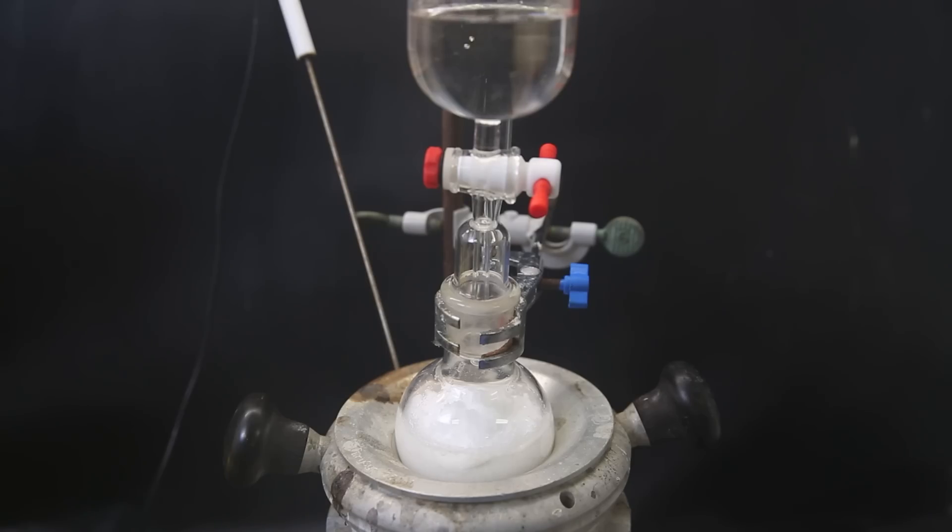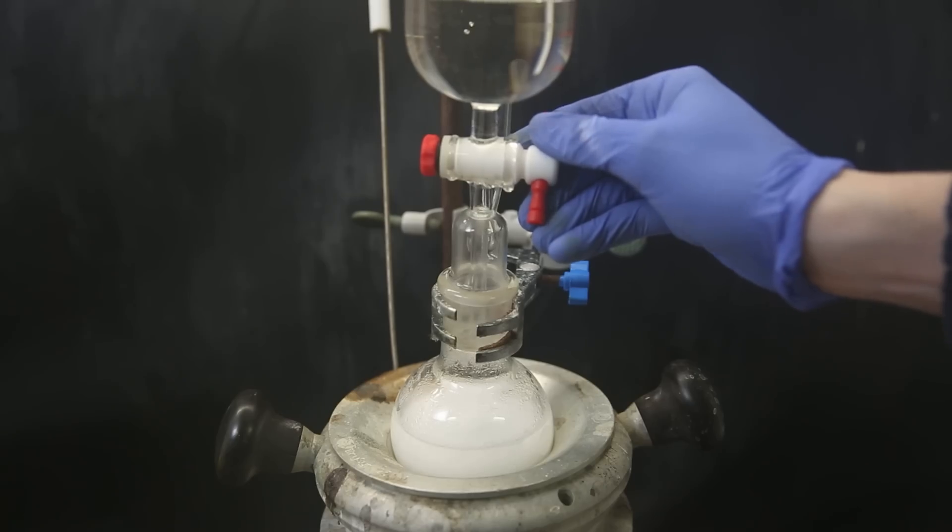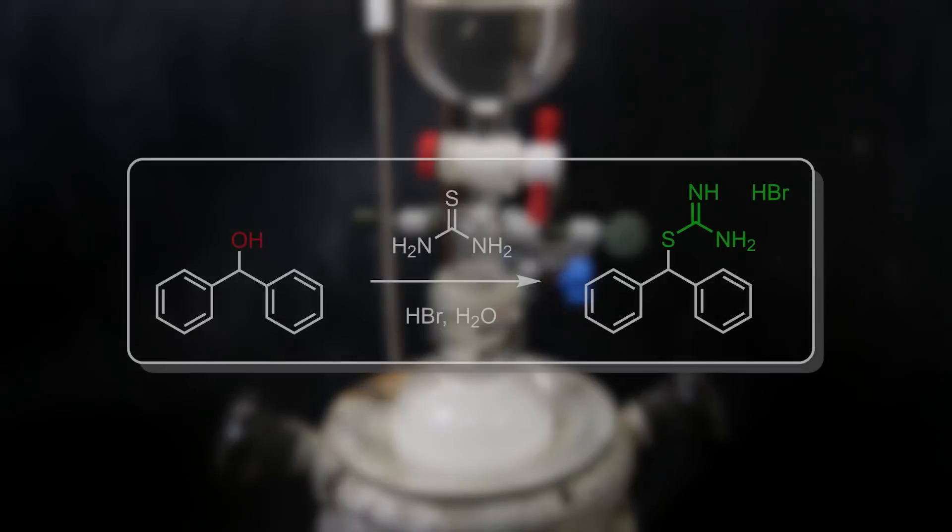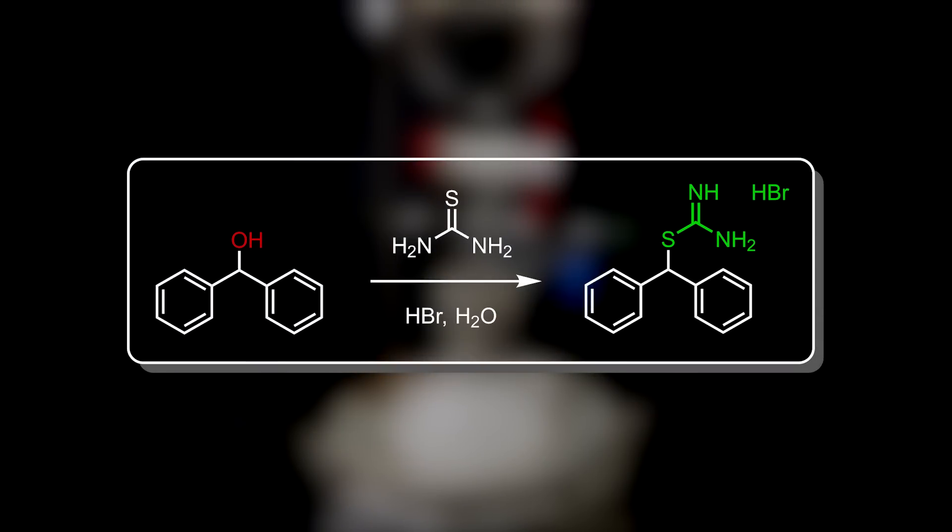I first leave this mixture to stir at 90°C and wait until it loosens up. When that happens, I dropwise add the hydrobromic acid and leave it to stir for an hour afterward. In this reaction, diphenylmethanol reacts with thiourea in the presence of hydrobromic acid to form this sulfide amidinium.